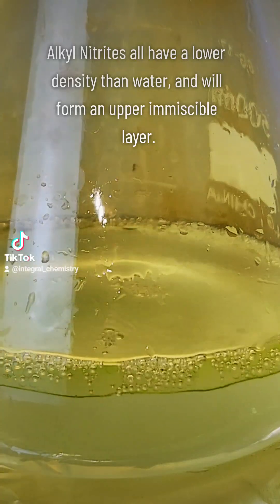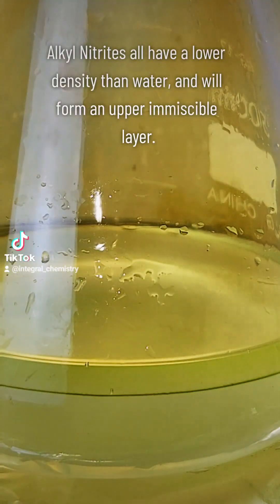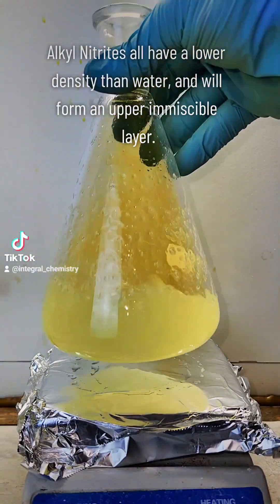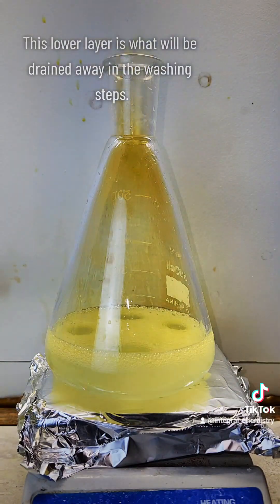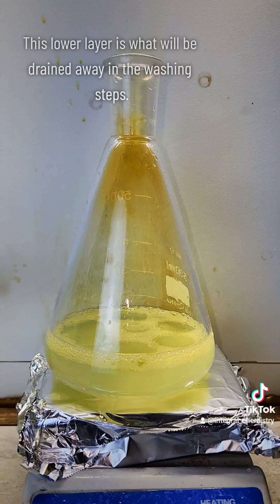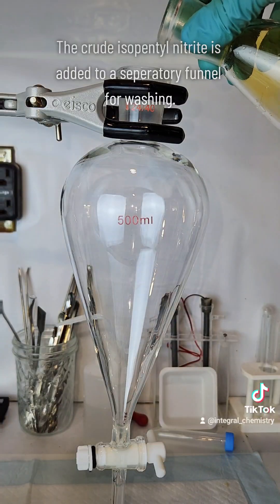Speaking of the reaction, this proceeds via a Fisher esterification reaction, and since I've done a couple of those on this channel, I'm not going to beat the mechanisms into the ground, but they're included at the very end of the video if you want to stay around to see them.